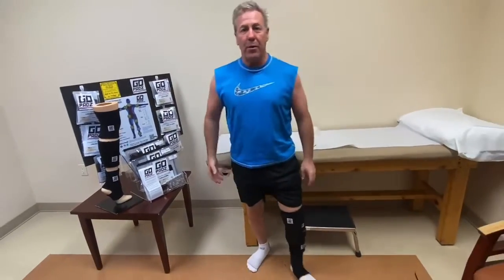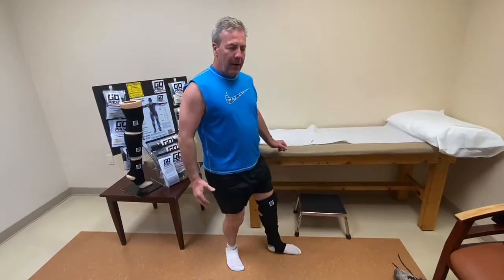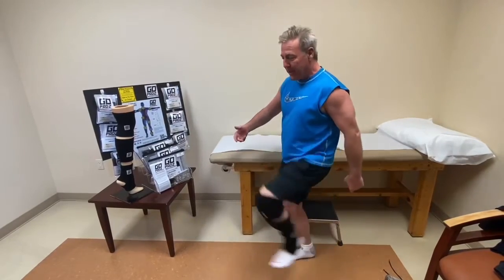I'm going to jump off the table because I've recovered so much from my surgery, and a lot of that had to do with GoPads. I have full mobility with my leg, and I'm showing what a great surgeon I had and how great GoPads is — it stays on.